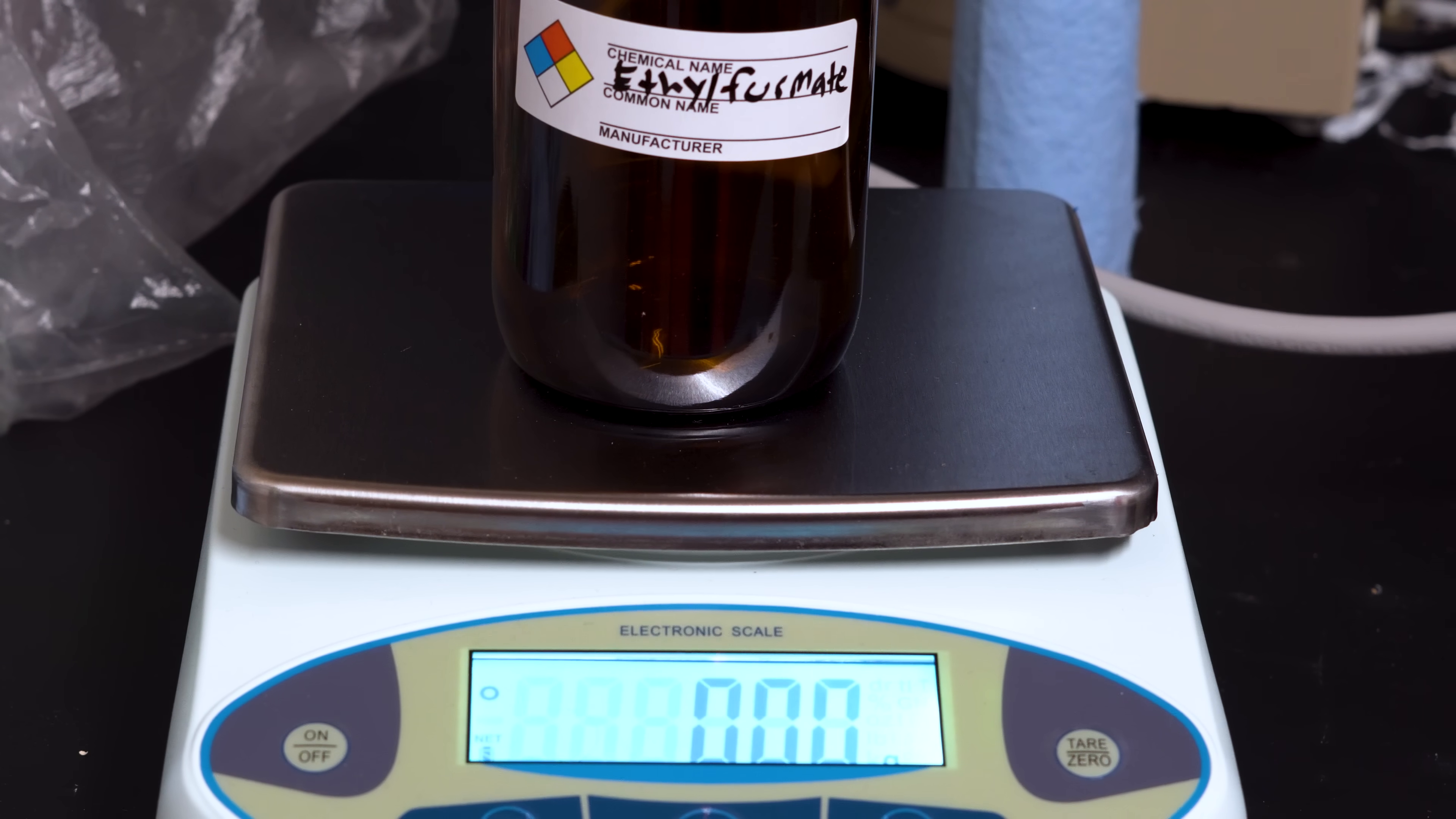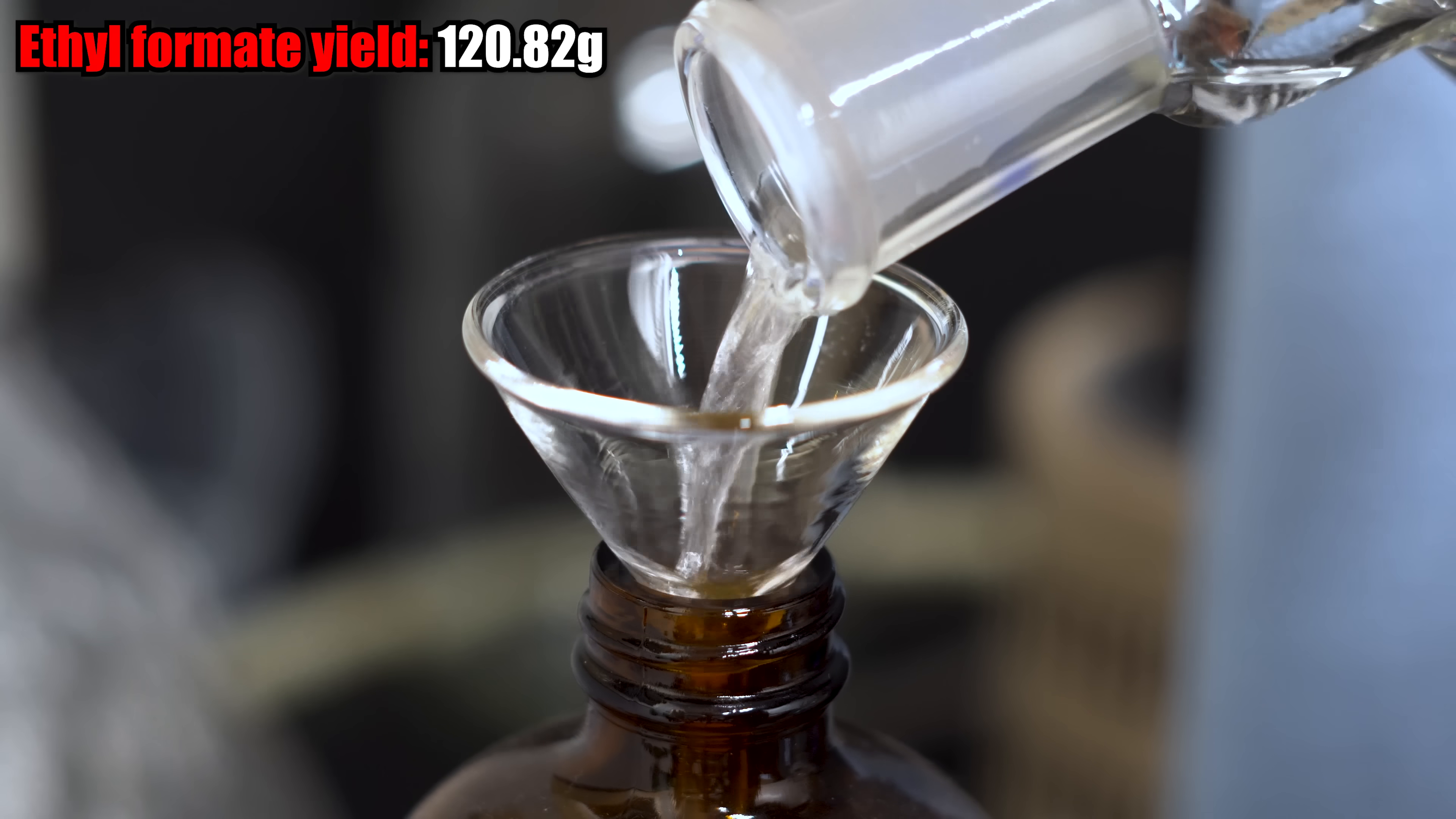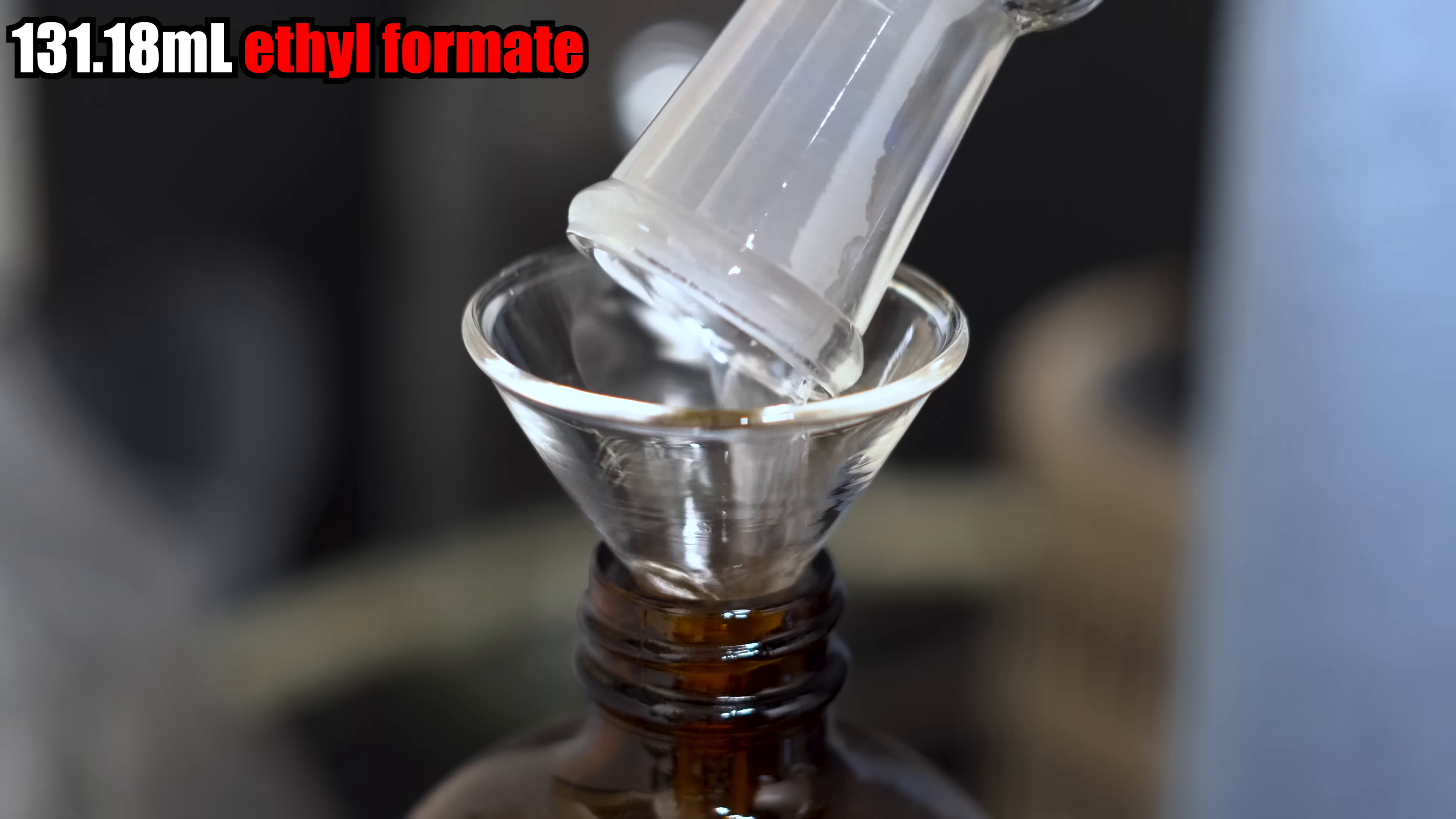I also weighed out how much ethyl formate I got. In the end, I got about 120.82 grams of ethyl formate. If this is pure, this would give us around 131.18 milliliters of ethyl formate.